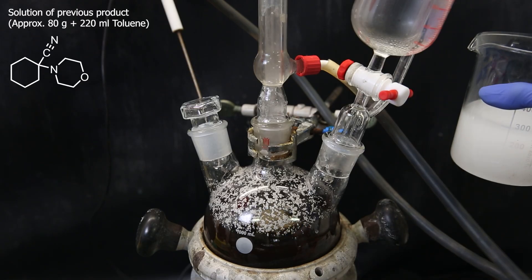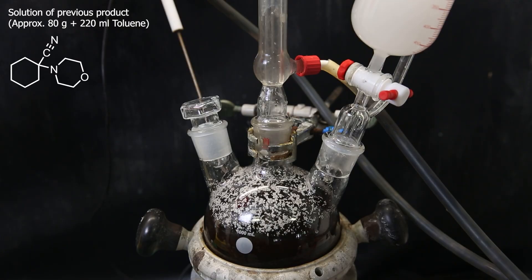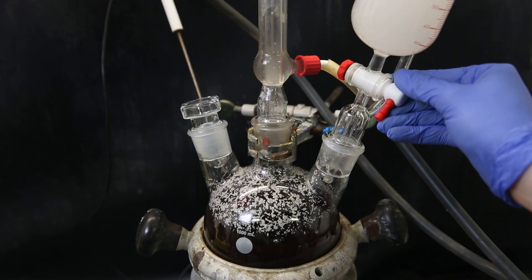And then, I add the cyanide product that had dissolved in toluene to the dropping funnel. I slowly add this solution to the flask, and the reaction is of course very exothermic.